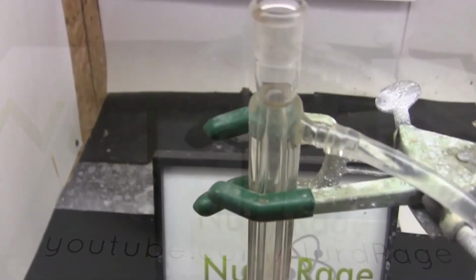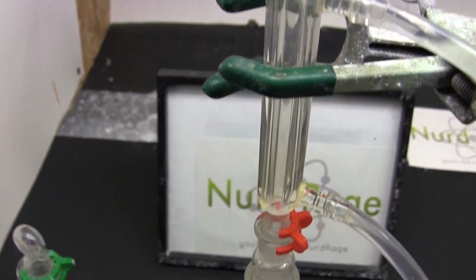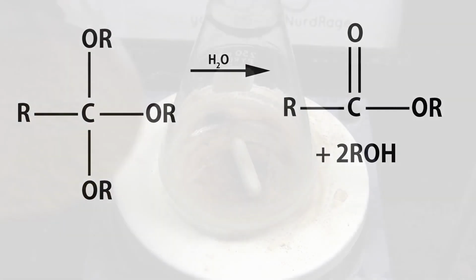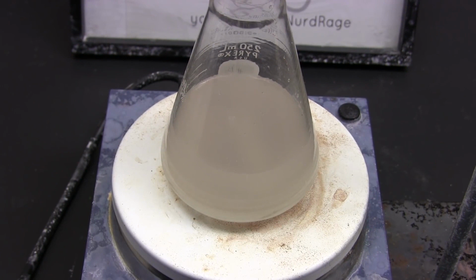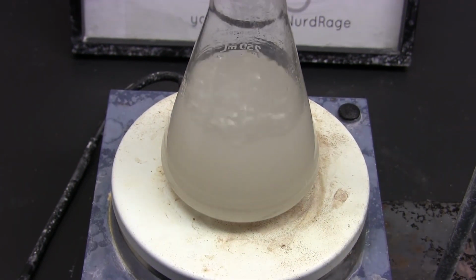Now set up a flask and stir bar with a vertical condenser column for reflux. I should emphasize at this point all subsequent apparatus should be meticulously dried before use. This is because orthoesters are very water-sensitive chemicals and irreversibly react with water to release their alcohols and normal esters they are made from. Now transfer the sodium methoxide solution to the reflux flask. Try not to transfer any of the molecular sieves, but a few pellets is not a problem. Now turn on the cooling water and start heating the mixture until it starts to reflux.